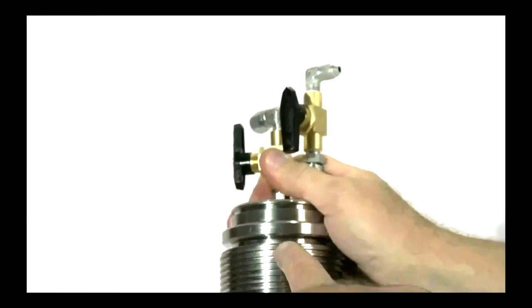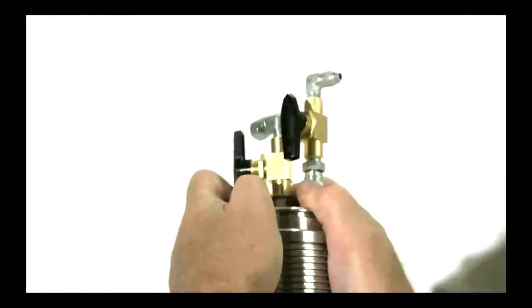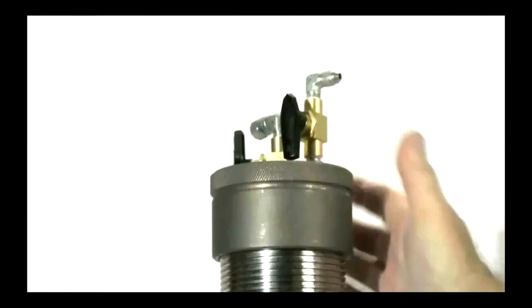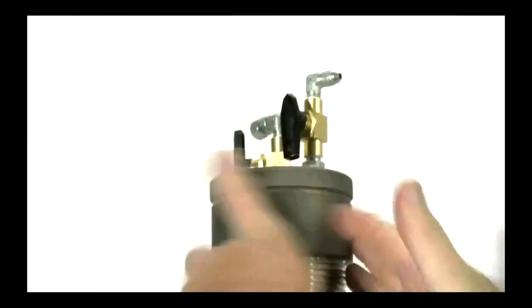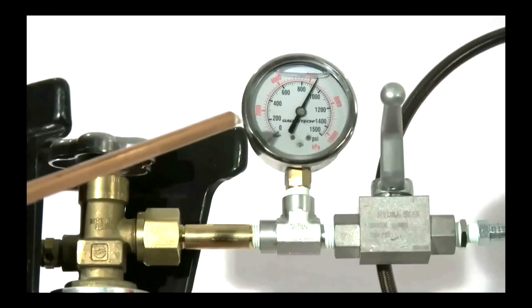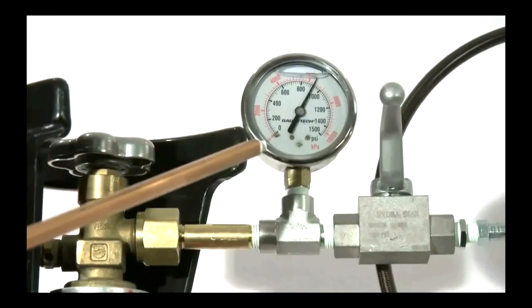The extractor top insert seals with an O-ring. The insert is pushed into the tube and fully seated. The retainer ring is screwed on to hold the insert in place. The retainer ring is only finger tight. At 30 Celsius the pressure should be greater than 900 PSI.